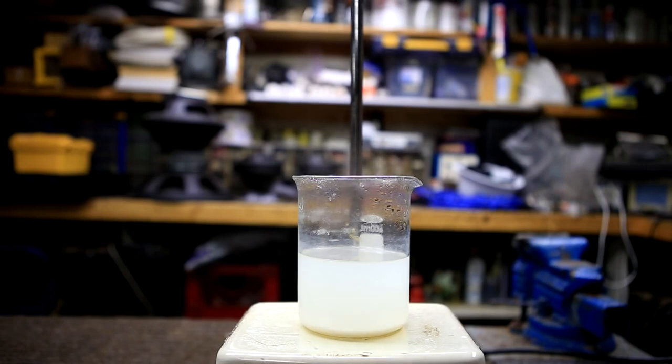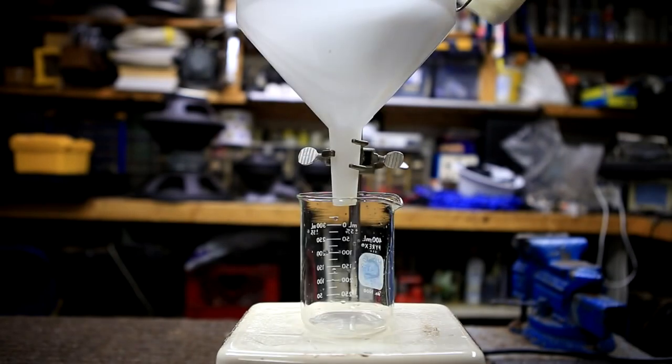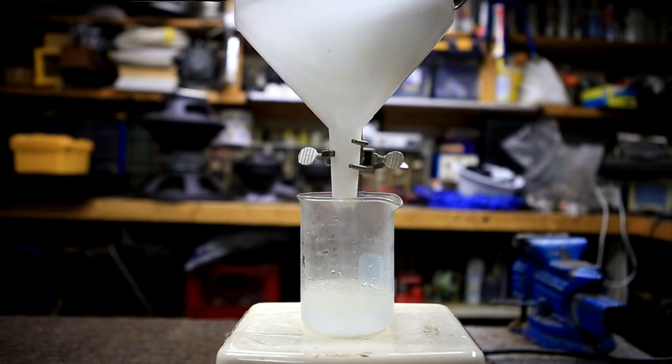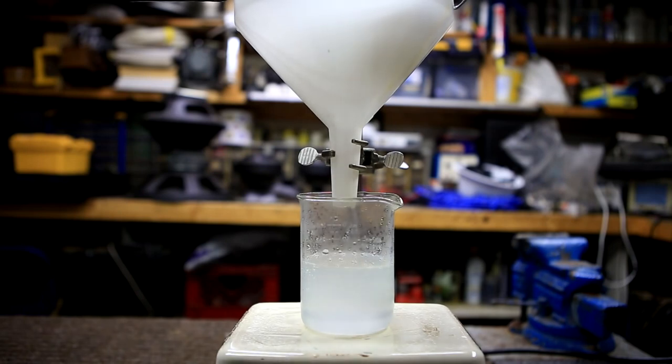The solution was allowed to stand so that undissolved materials would settle at the bottom. This again was gravity filtered. The insoluble material was washed twice using 25 milliliters of water.